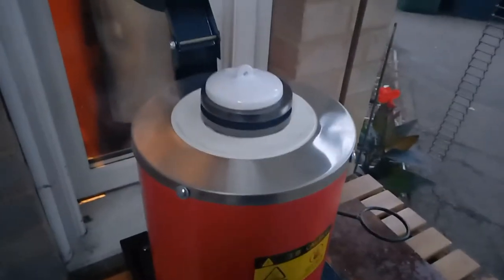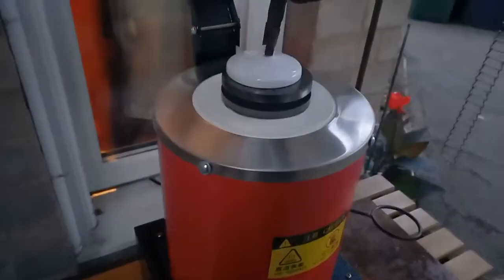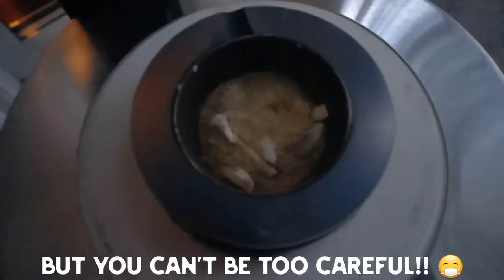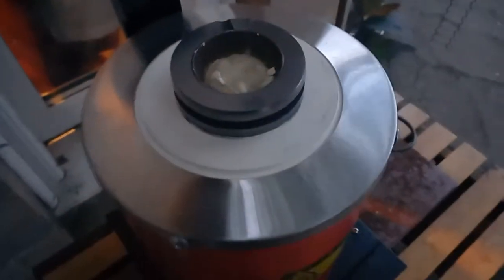This bit of smoke that escapes — I think it might be hydrogen cyanide, but I don't know. Some things are getting black around the edges, just like I've seen before.